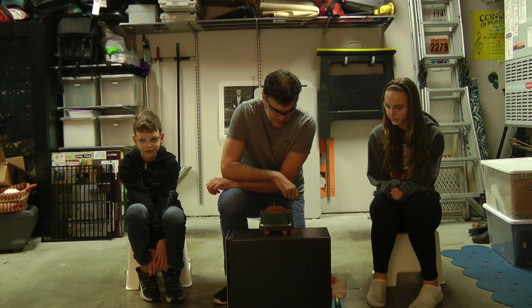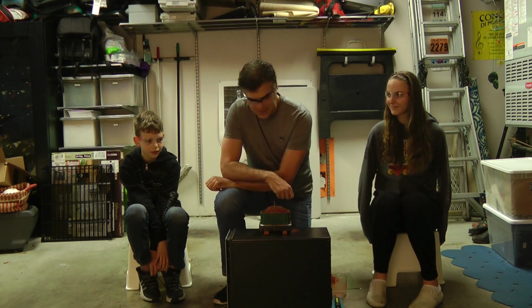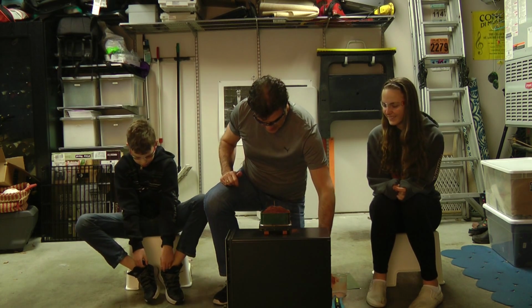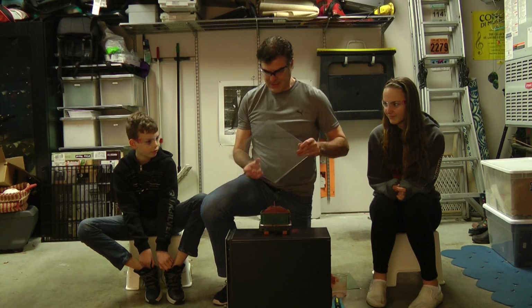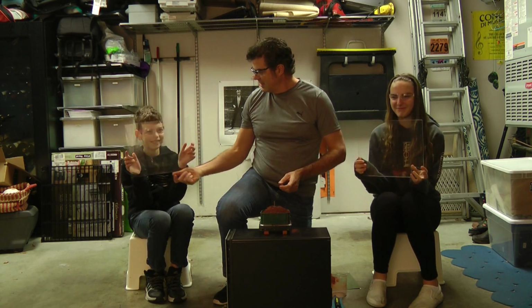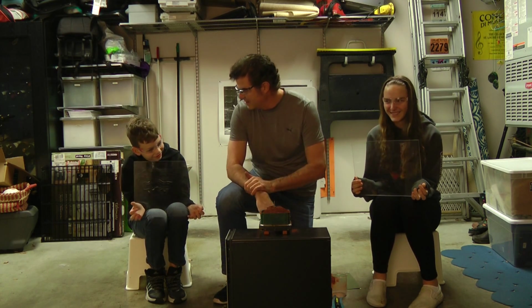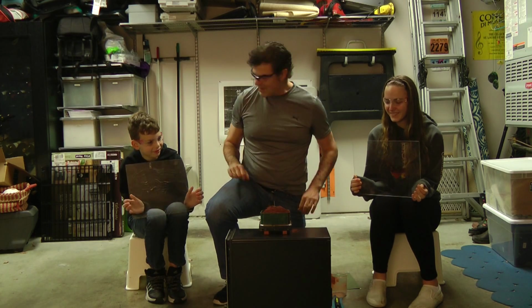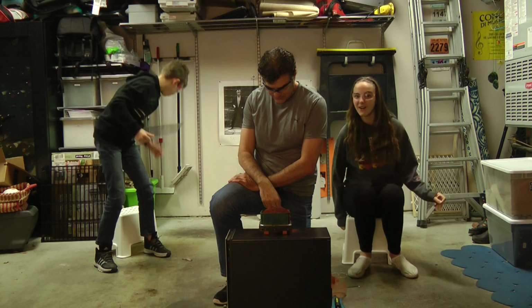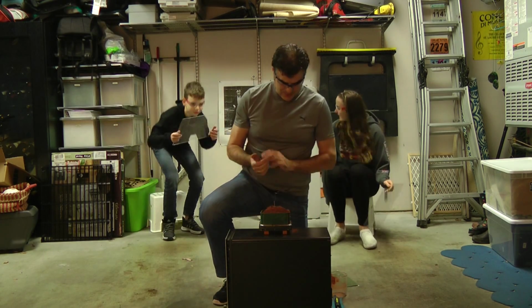Now, we have quite a bit of thermite here, and so at this point it's probably worth talking safety. So I'm going to give you our plastic Lexan blast shields, okay? And you're going to use these to protect as many vital body parts as you can. Okay, now I would recommend you move back a little bit. Move back by the wall. The wall? Okay. There we go. Okay.